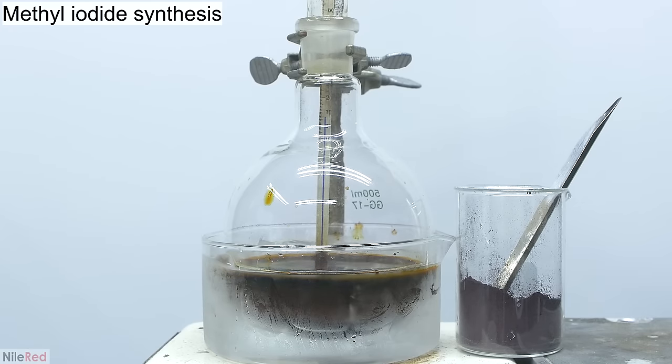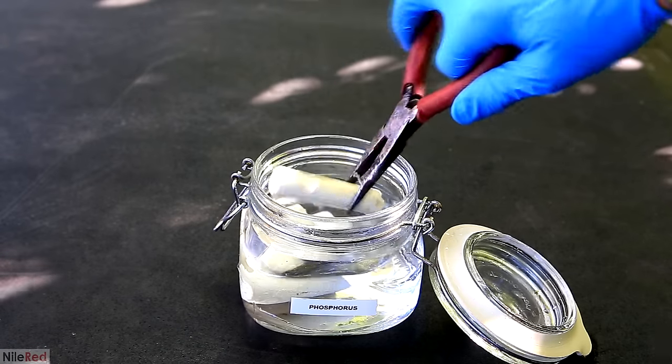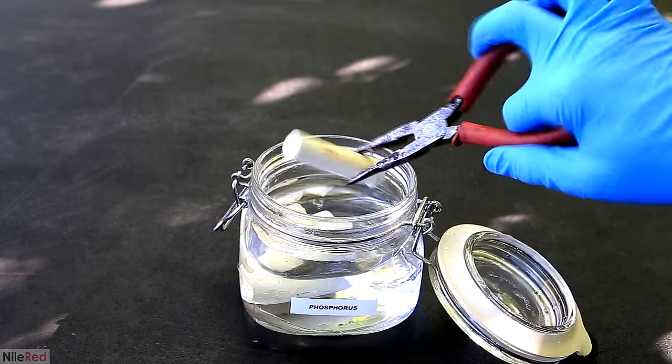Anyway, with that being said, red phosphorus is a useful reagent in organic chemistry. In the past, I've used it to make things like methyl iodide and in the future, I plan to convert it to white phosphorus.